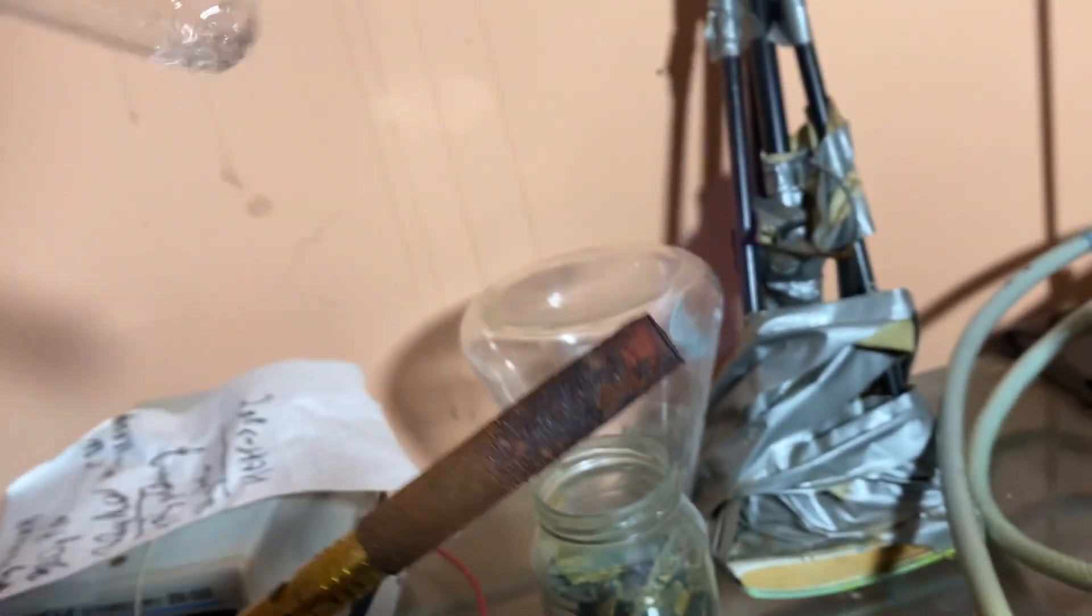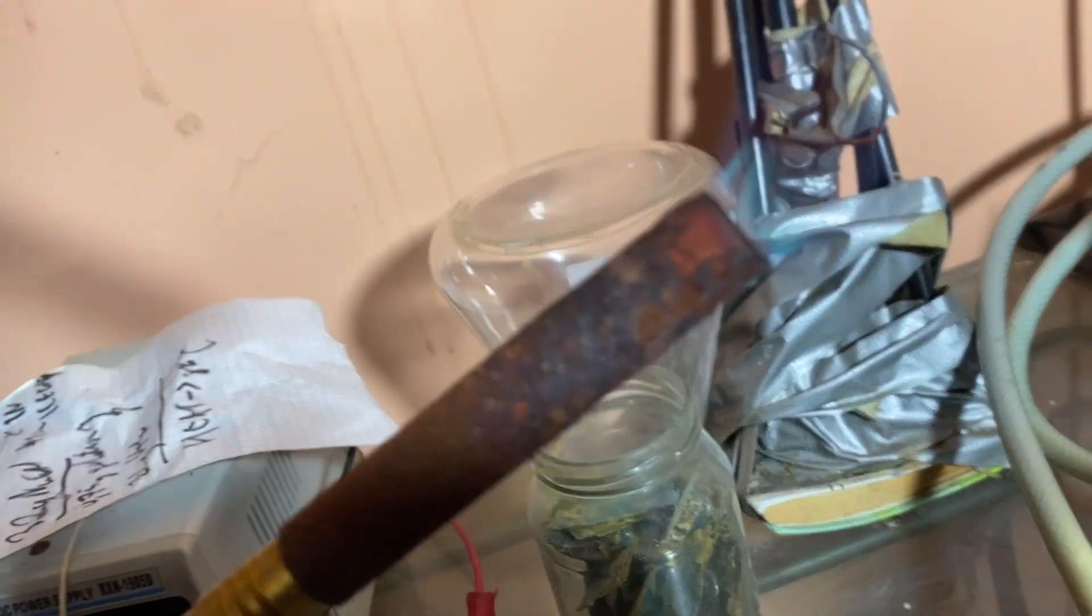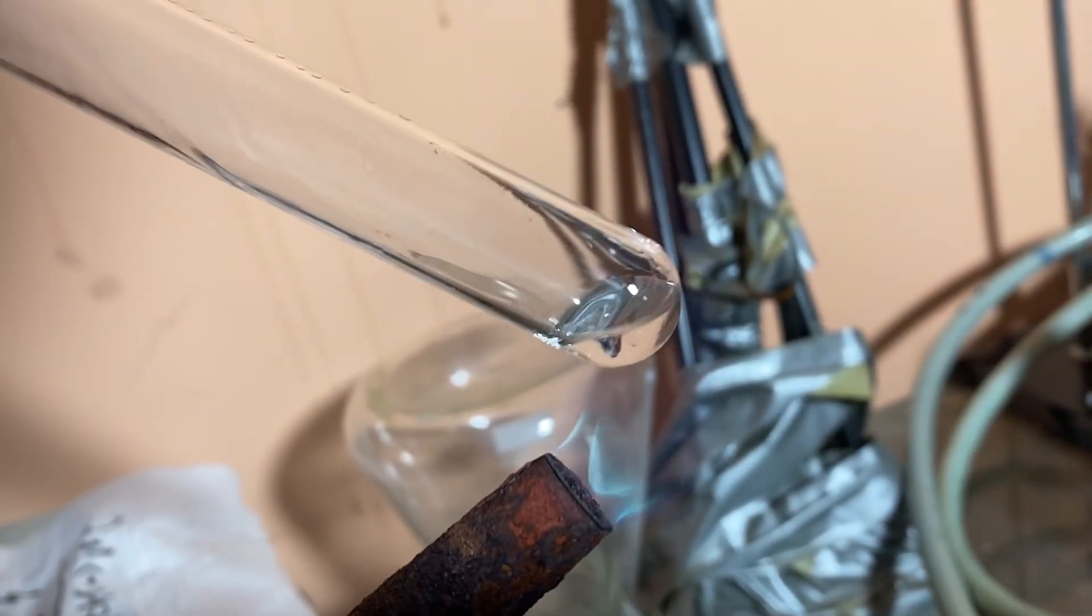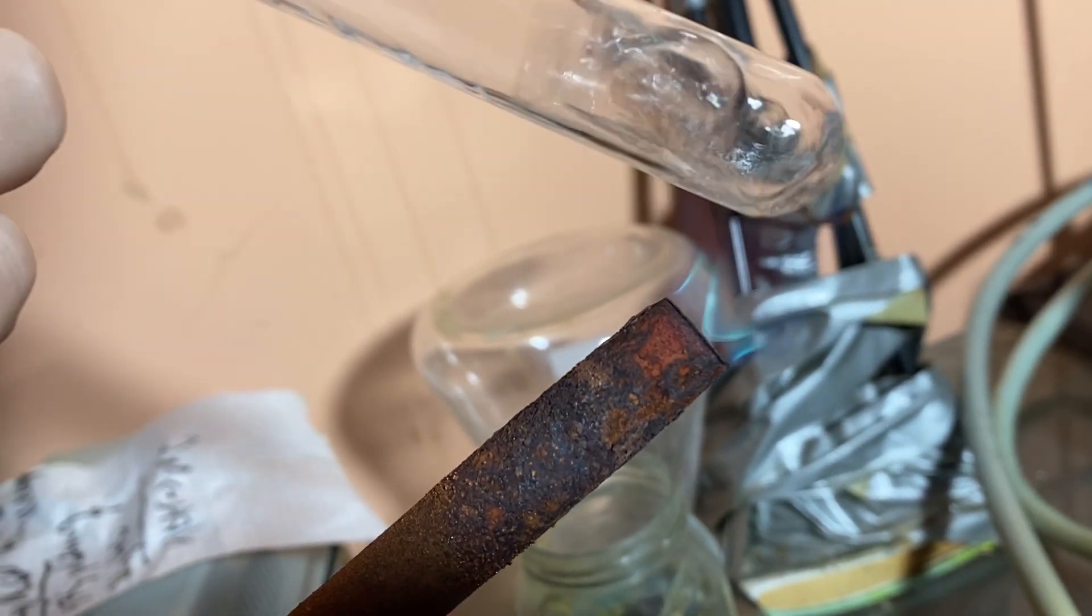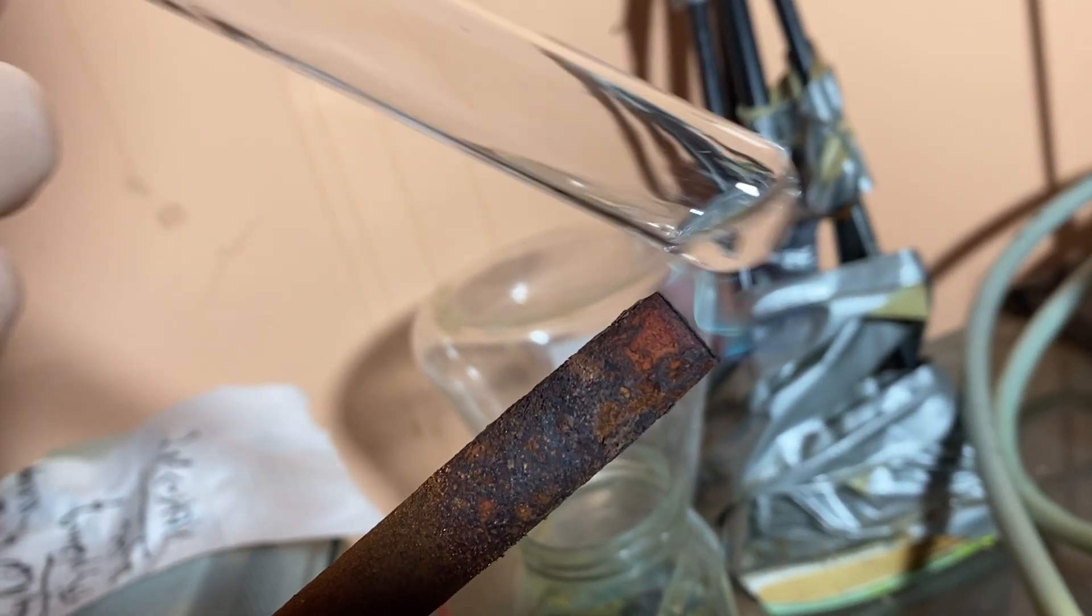Here I've pipetted a sample of the solution into a test tube and I was heating it with a blowtorch. I've wanted to see if there was any water in it and it seems like there was quite a bit of steam. And that gave me a tip that I should probably heat it a little more.